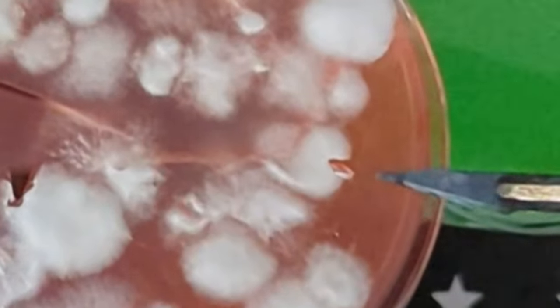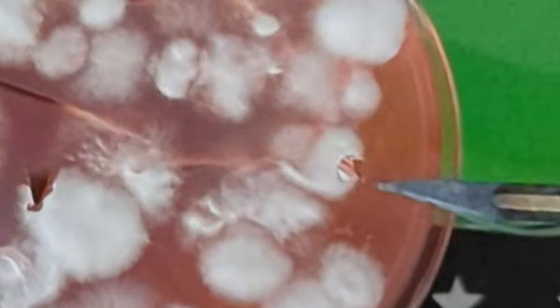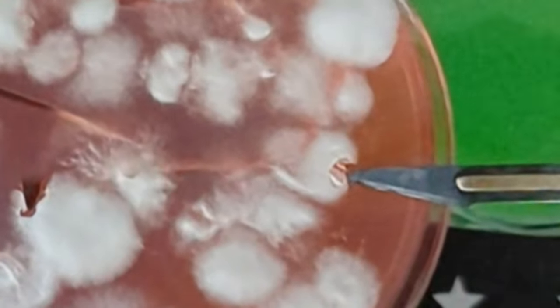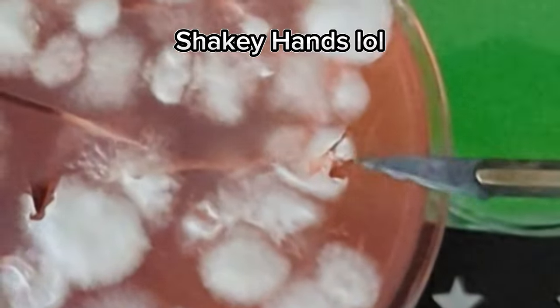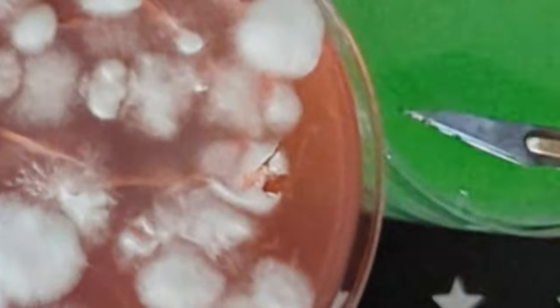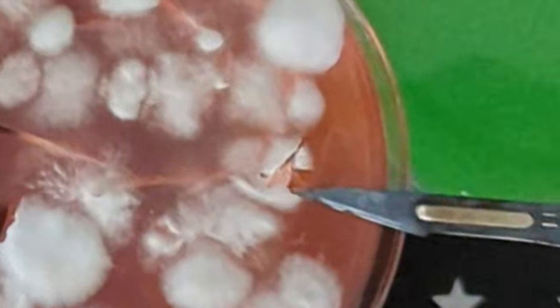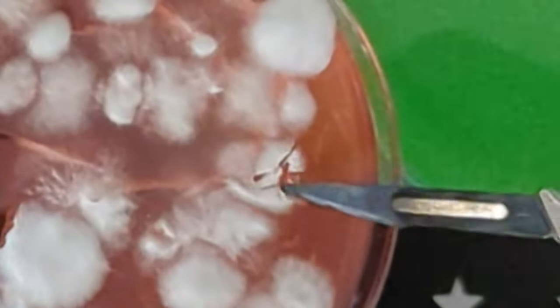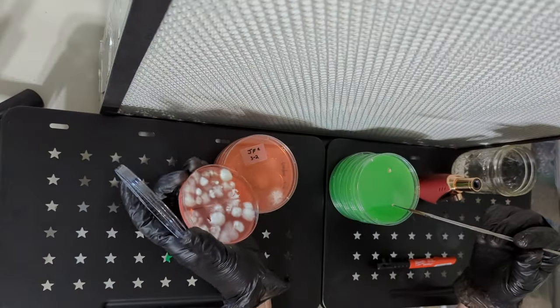When the mycelium from two spores meet, they can mate. If they mate, this is known as a dicaryon. We are trying to grow mushrooms, so we want spores that mate because monocaryons don't fruit or make mushrooms if they are cubensis. The spores only mate one time, so everywhere you put spores on the plate there are likely many different matings occurring. This will usually result in many separate cultures on the plate.